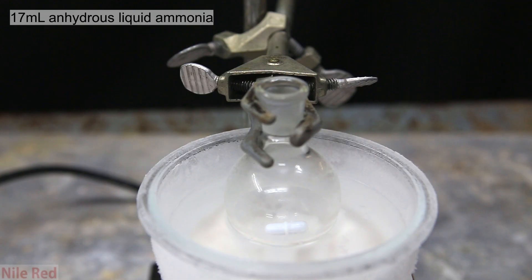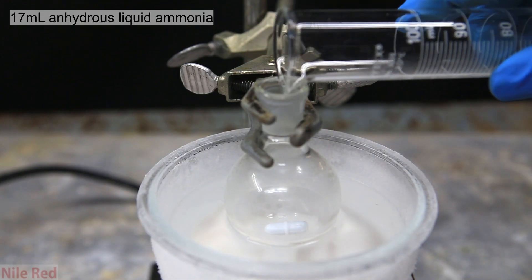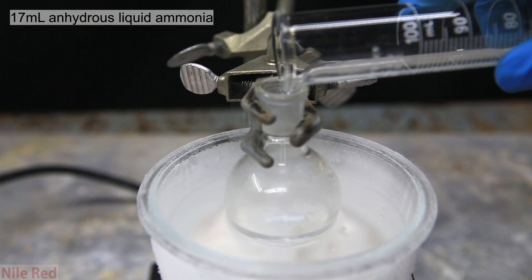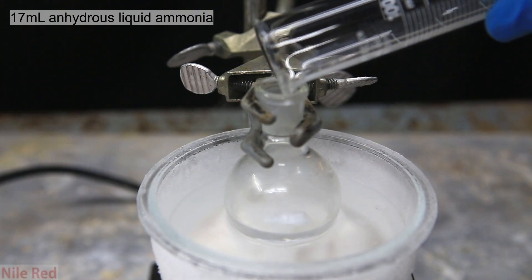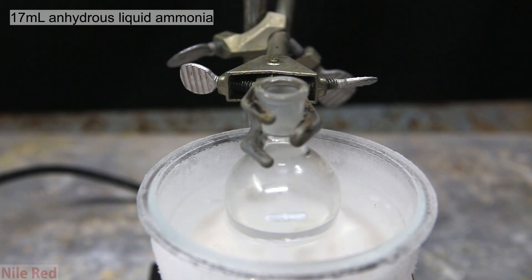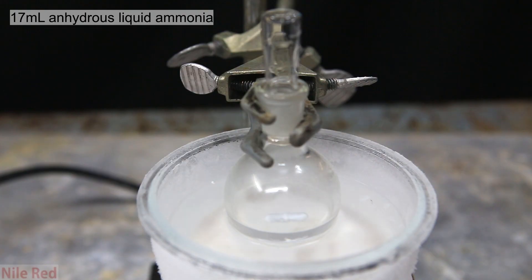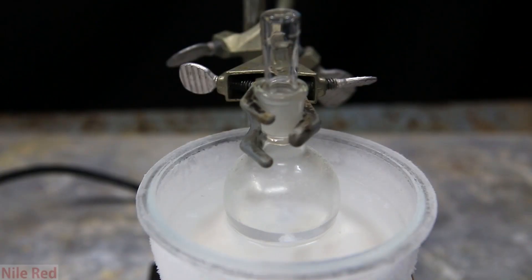I started off by adding 17 milliliters of anhydrous ammonia to a cooled round bottom flask. The round bottom flask is cooled by filling the bowl with some dry ice and then pouring in some acetone. To limit the loss of ammonia we cap it in between additions and then we start a little bit of stirring.